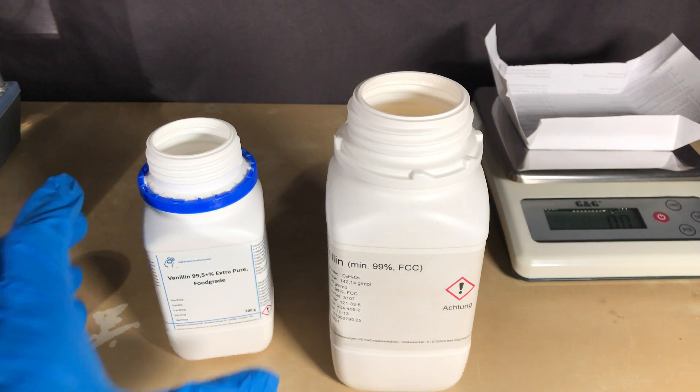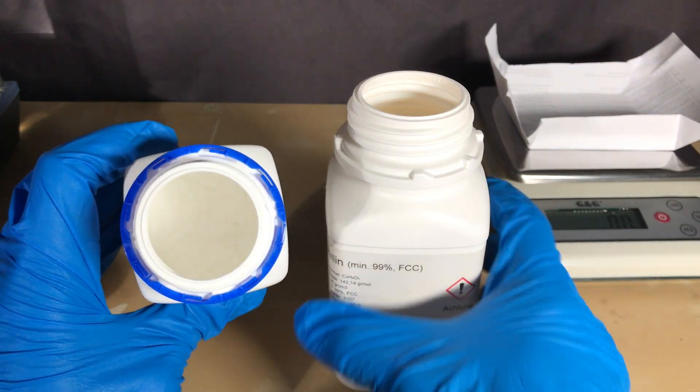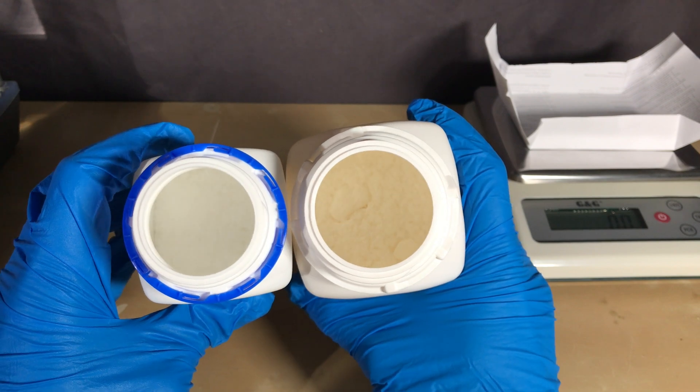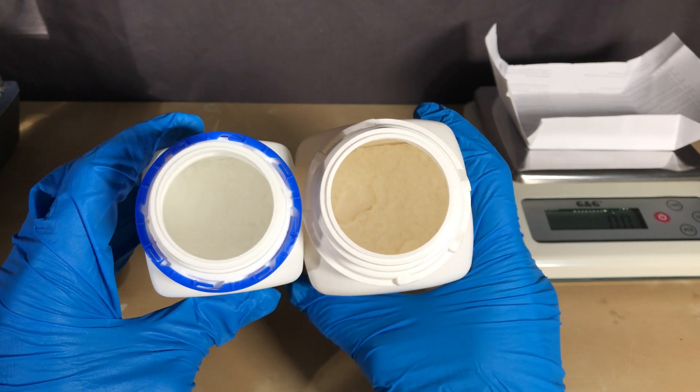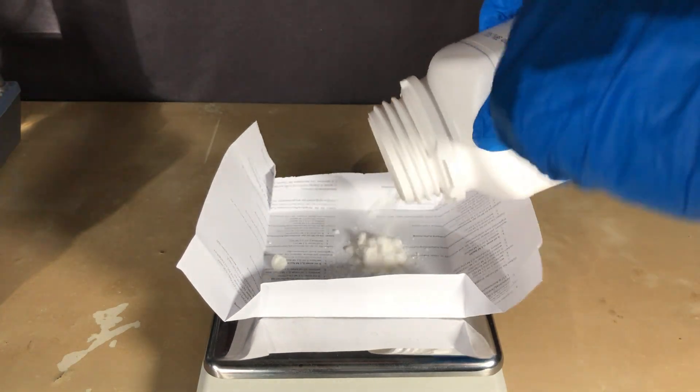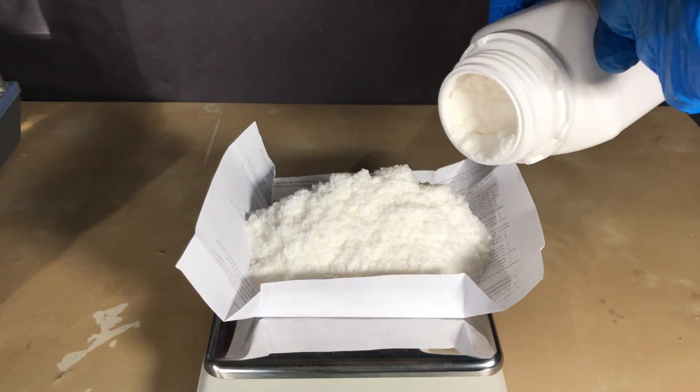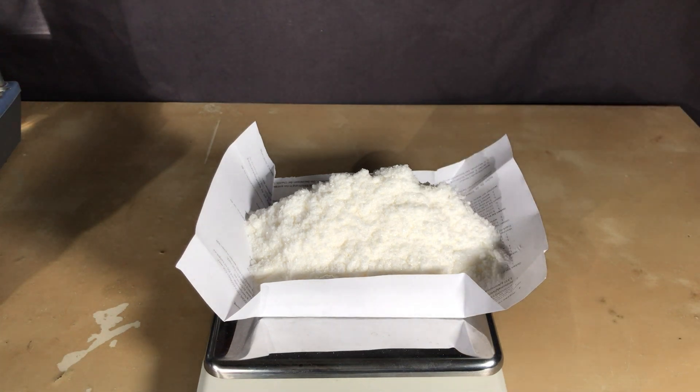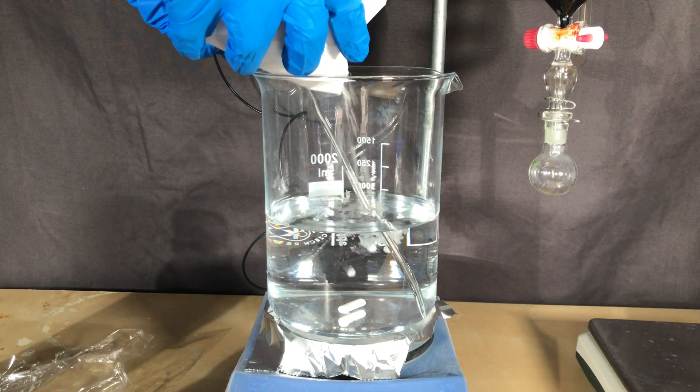The vanillin I just showed you is from a different company and it looks somewhat yellow. The LaboratoriumDiscounter vanillin looks perfectly white, so it's a sign of purity I'd say. I am still going to use the vanillin which looks less pure because I need the very pure stuff for a different project which you are going to see soon. I ended up using 152.2 grams of vanillin and a liter of methanol.